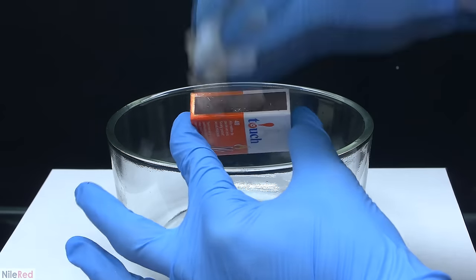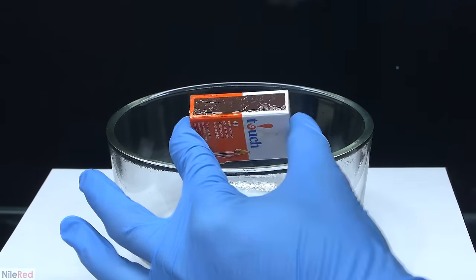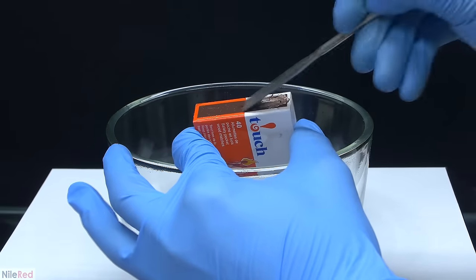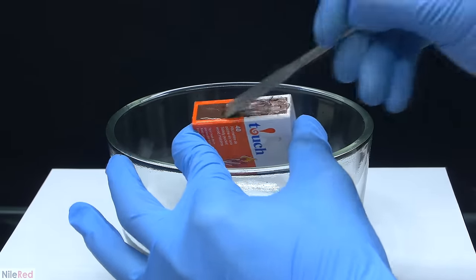After trying out a few different methods and solvents, I found that the easiest way was to just dab the matchbox with a wet paper towel and then scrape off the red phosphorus using a spatula.